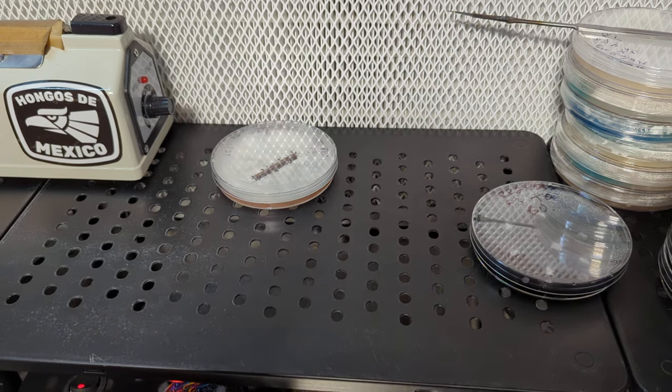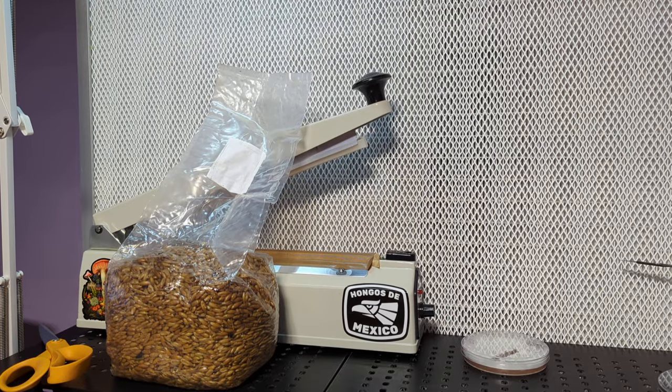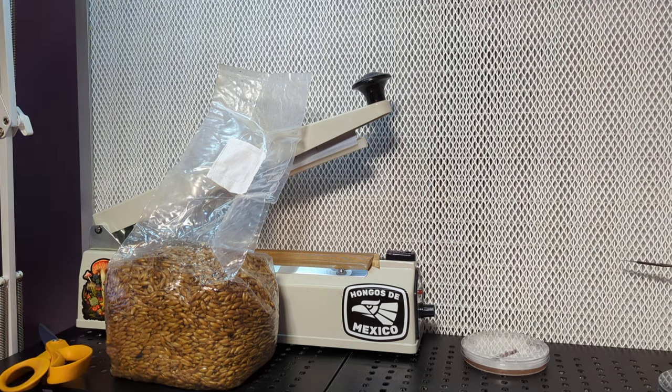Always be aware of sterile technique - I was swooping a bit close to going over the top of the plate with my hand, which wasn't a great move. I'll cover that back up, re-sanitize my hands one more time. Now I have my backup plate with all my various backup dikaryons - that gets wrapped up in case this multi-spore does fail. Although this one looks fairly clean so I feel relatively certain it'll be fine.